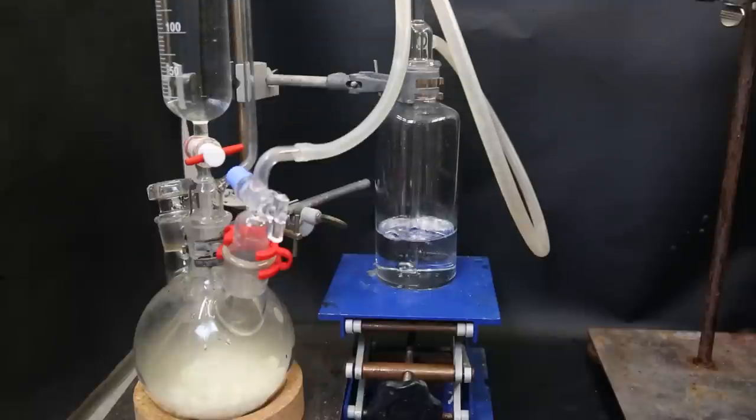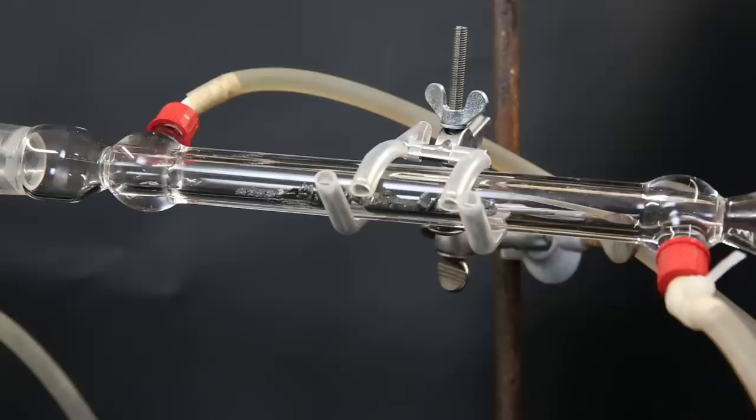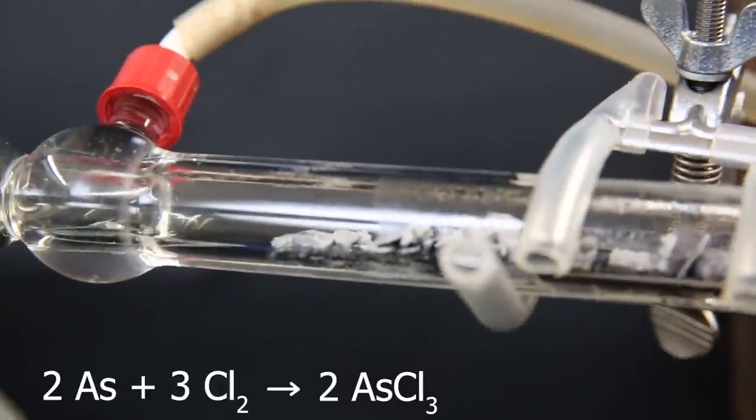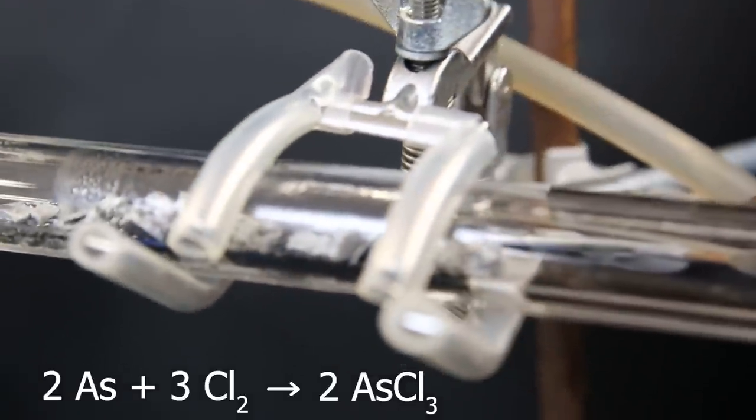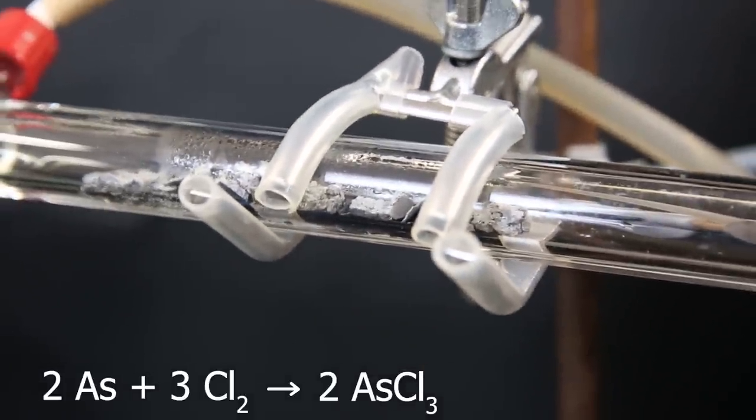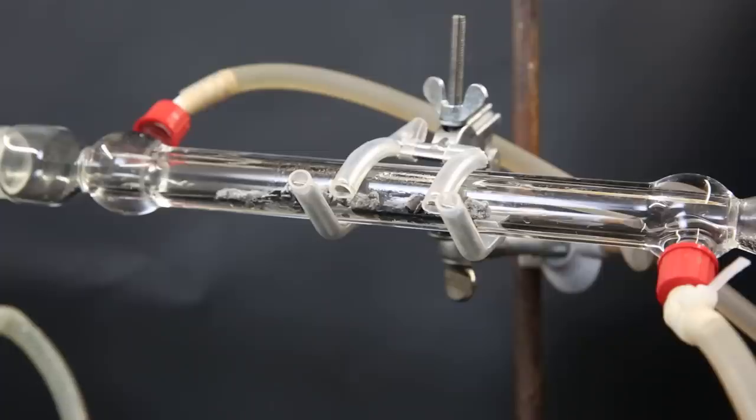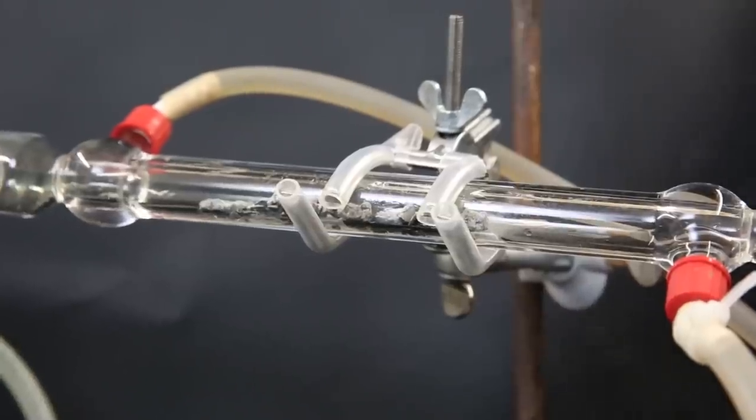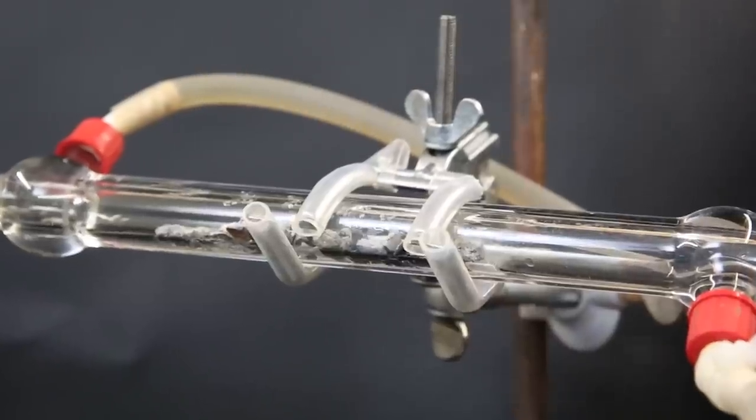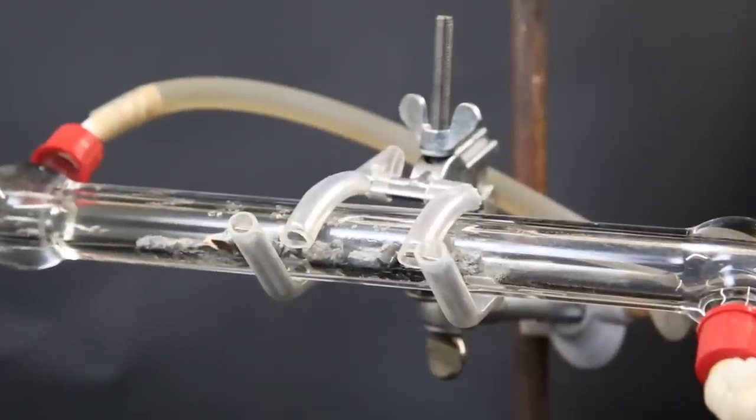We can see gas is starting to go through the gas washing bottle. At first, not much is happening, since all of the air still has to be pushed out. So we wait for the chlorine to fill the apparatus. After a few minutes, we can see something is happening. The arsenic pieces are becoming white, and some vapors are condensing in the apparatus. I test out some different speeds of the chlorine production, and when a lot of chlorine is produced, the reaction causes the arsenic pieces to ignite and glow from the heat that is produced in the reaction.